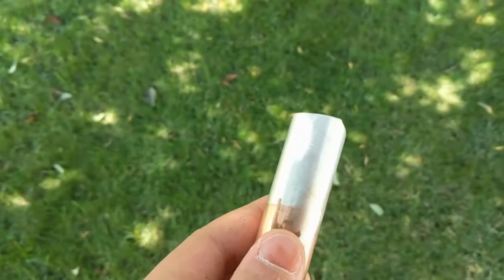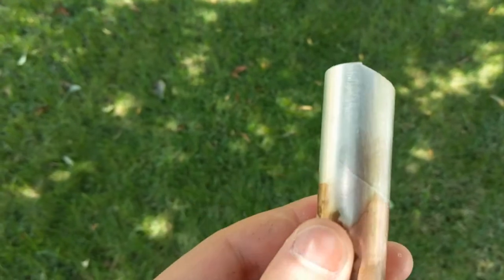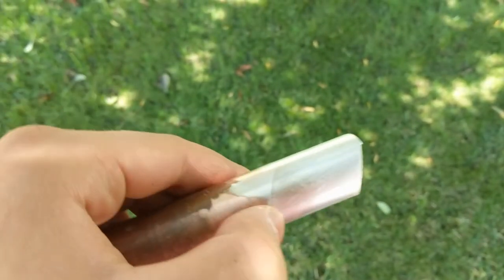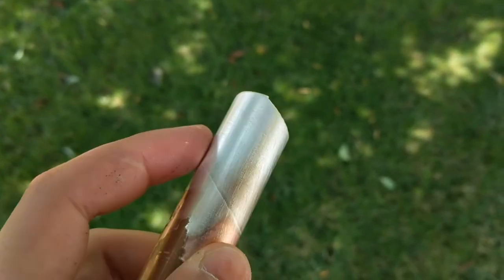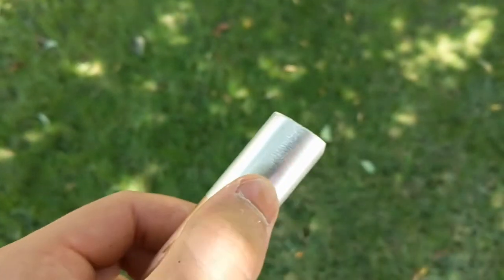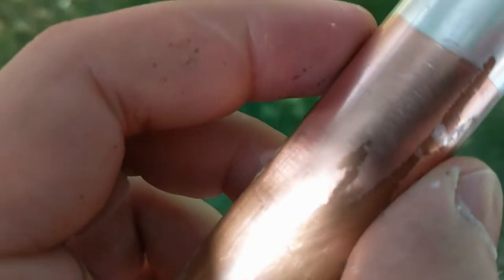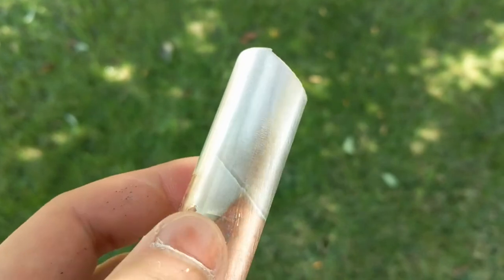Today's the next day, and as you can see the outer coating it's left is a very nice silver color. This area I had inclined initially for about 30 seconds and you can see the silver color isn't quite as intense — it's a bit darker. The rest, which I turned around, has gotten a nice thicker layer. I've given this a scrub with a classic kitchen dish scrubber to see if it was resistant, as it also had a strange white coating, and it does withstand those scratches.